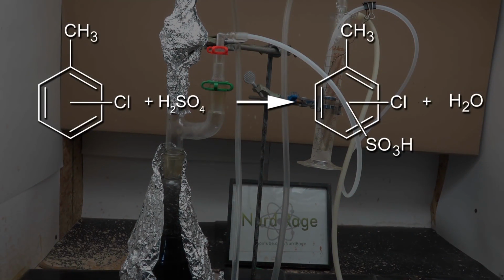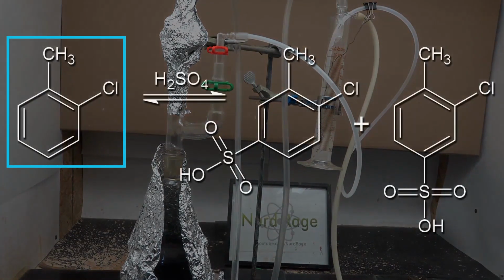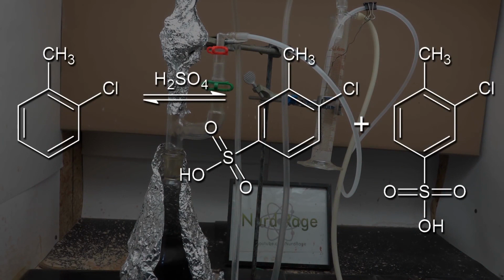By turning up the heat high enough to boil the mixture, the water boils out along with chlorotoluene. The Dean Stark trap allows us to conveniently separate and return the chlorotoluene and just keep the water. By removing the water from the reaction, we drive it forward. Now an interesting thing happens with the isomers of chlorotoluene. Orthochlorotoluene reacts faster and is more stable than parachlorotoluene.